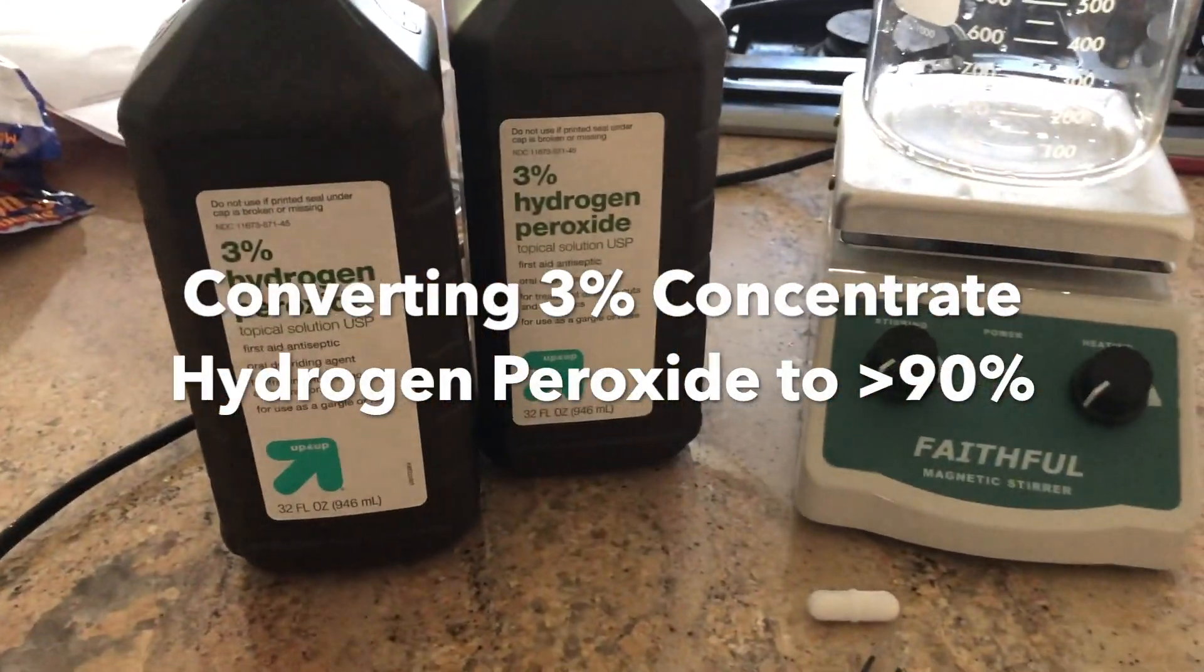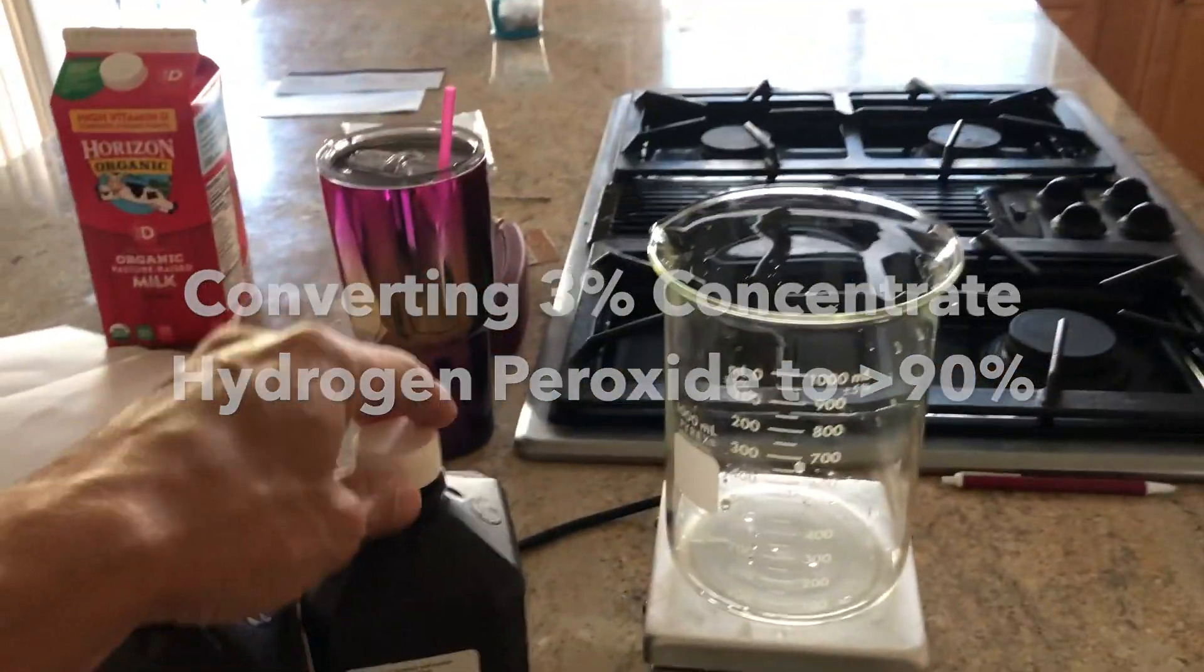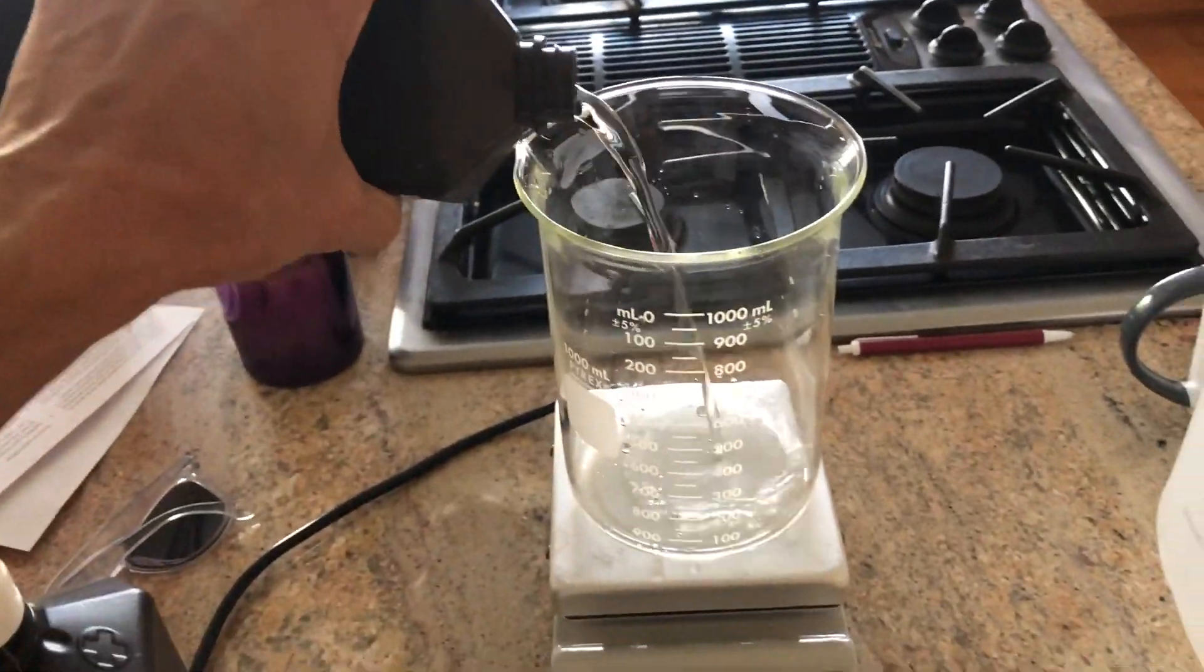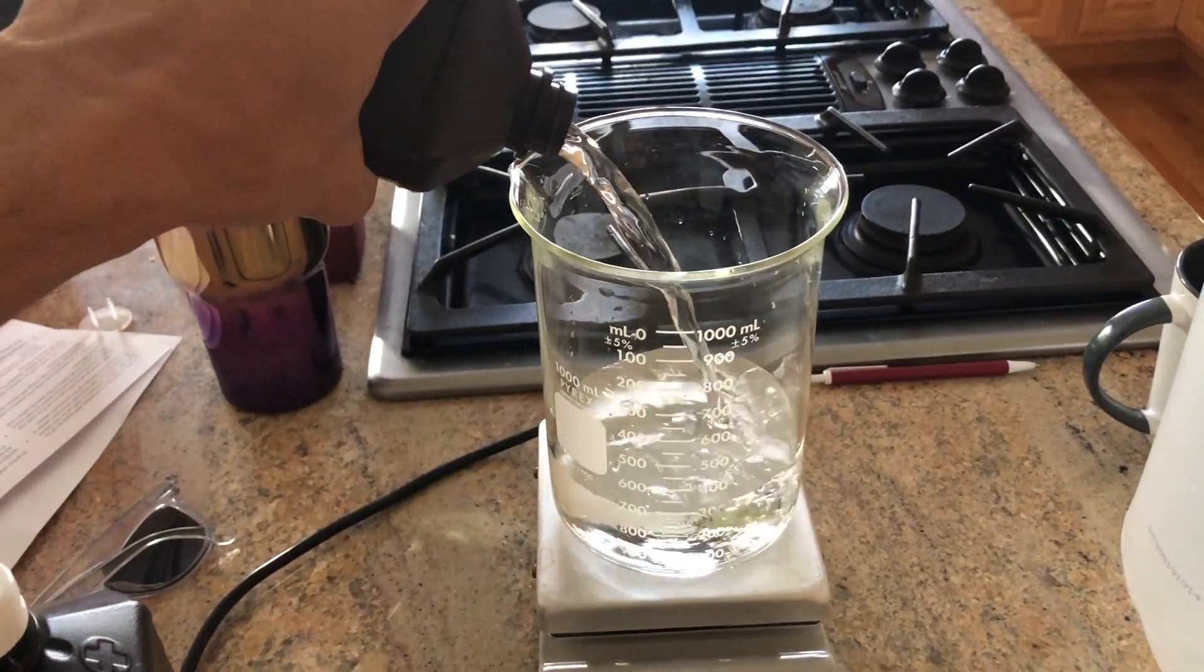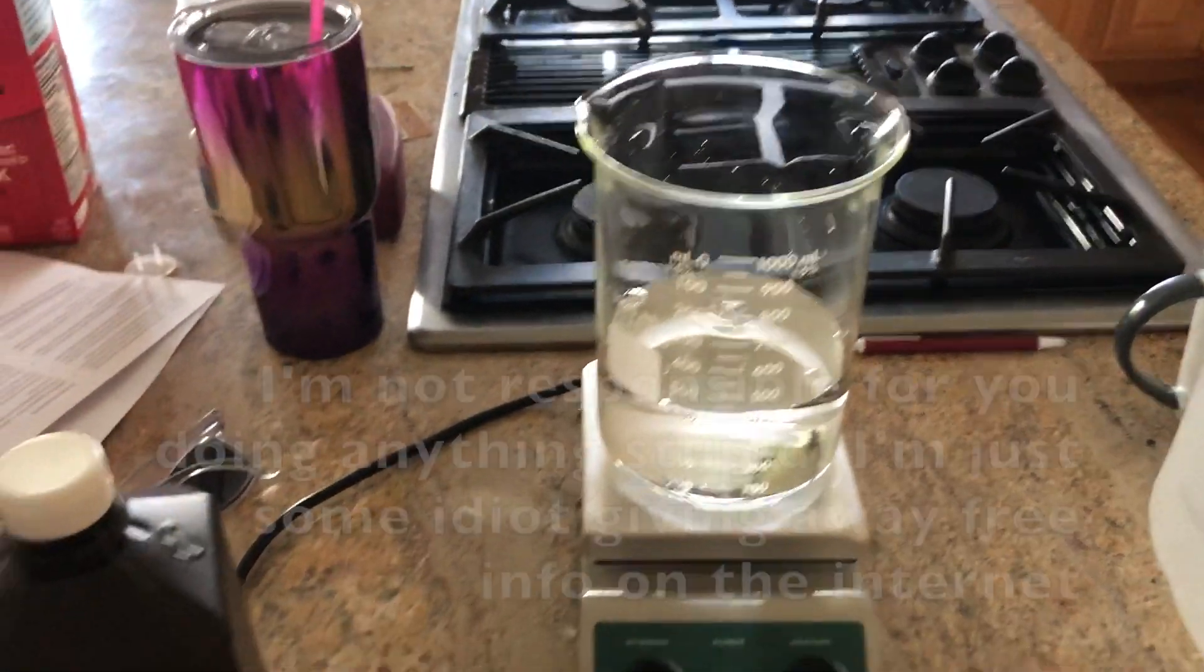We're starting out with just regular 3% hydrogen peroxide. Step one, pretty simple. We're just gonna open air heat it down to about 10% volume. So what I'm gonna do here is put about a liter in here.